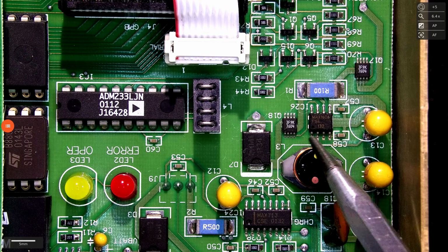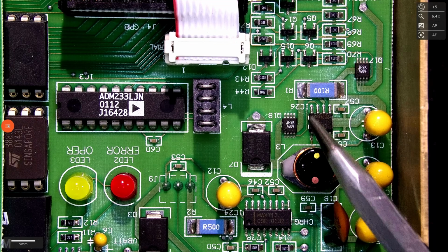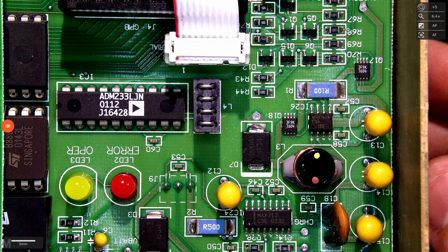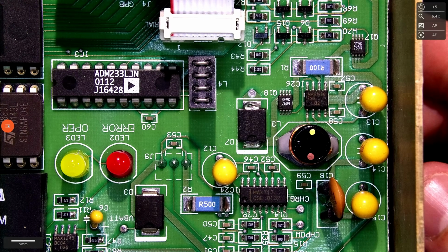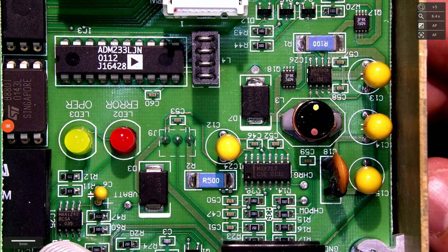Now, I could remove this potentially, but if I remove it and power it on, there is a chance that the stray voltage here might turn this on. I'm not sure if this is an NMOS or a PMOS, but just to avoid risking any problem, we could just replace it. These are not expensive parts. I can just get some from DigiKey and quickly take a look at it.